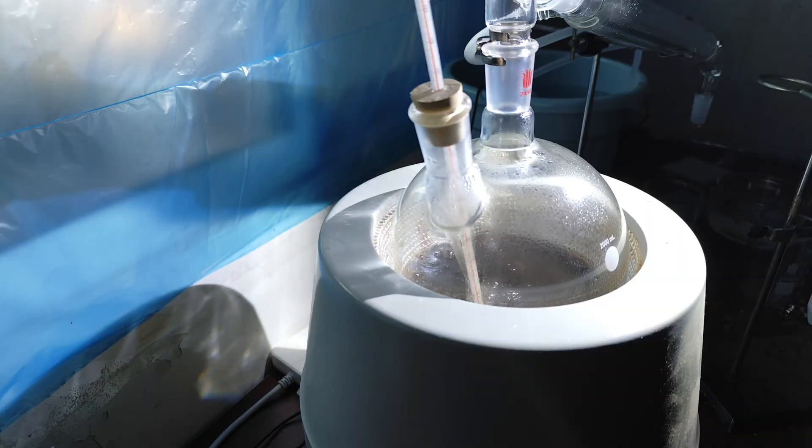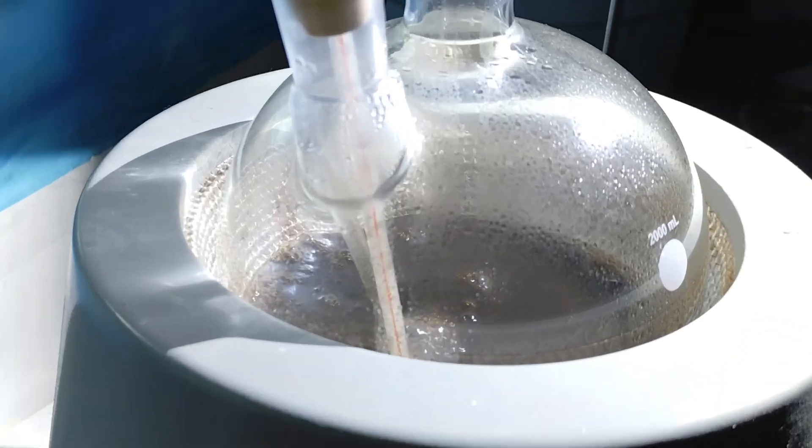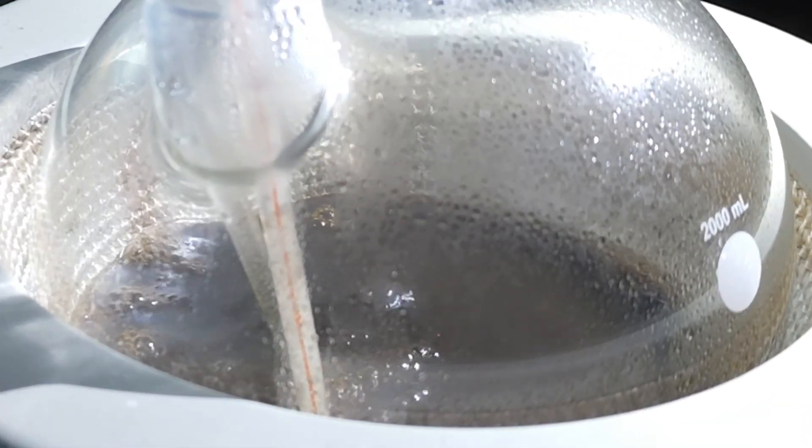After a long time of waiting, all the product is out. What is left in the big flask is simply just some black and dirty liquid.